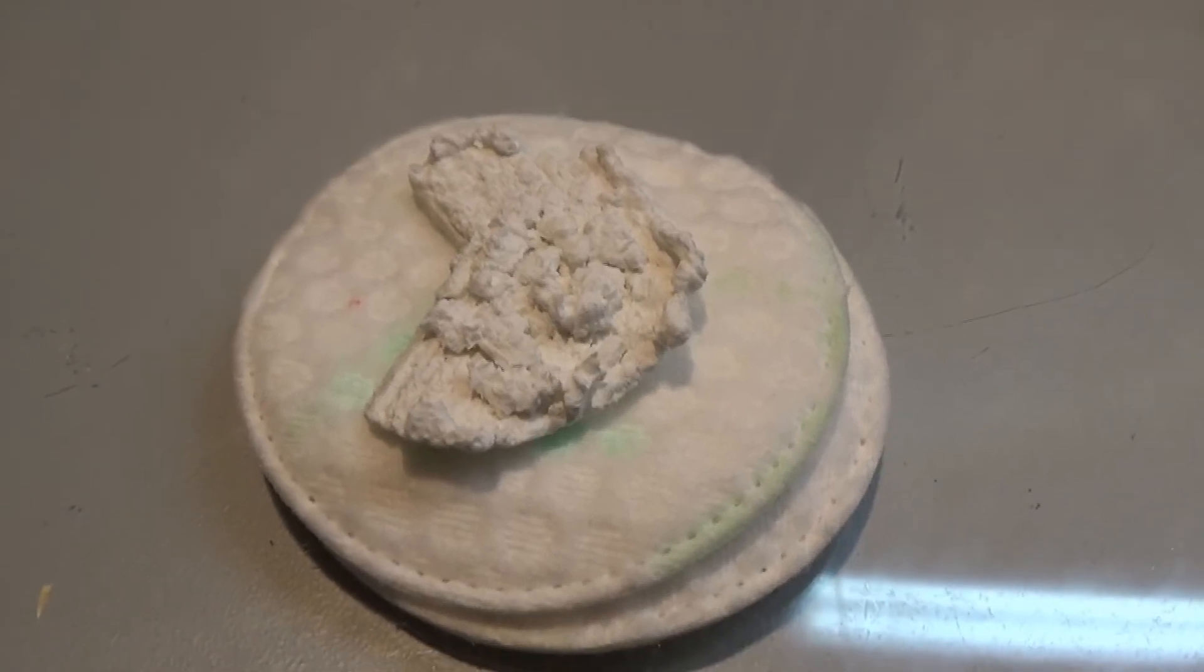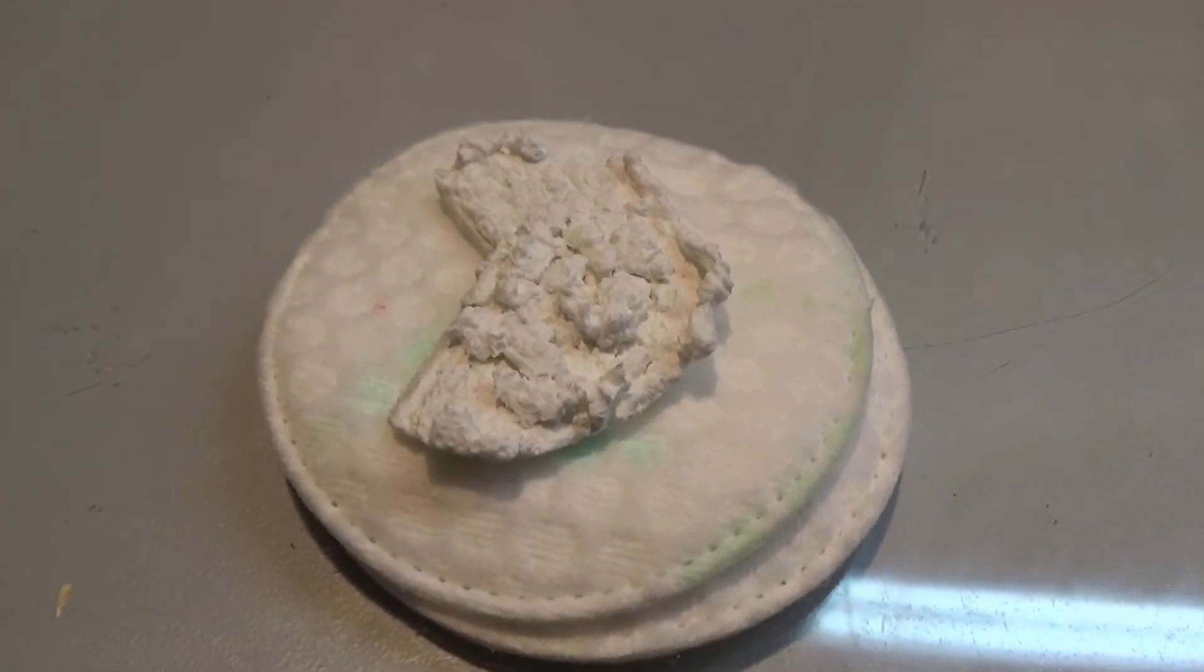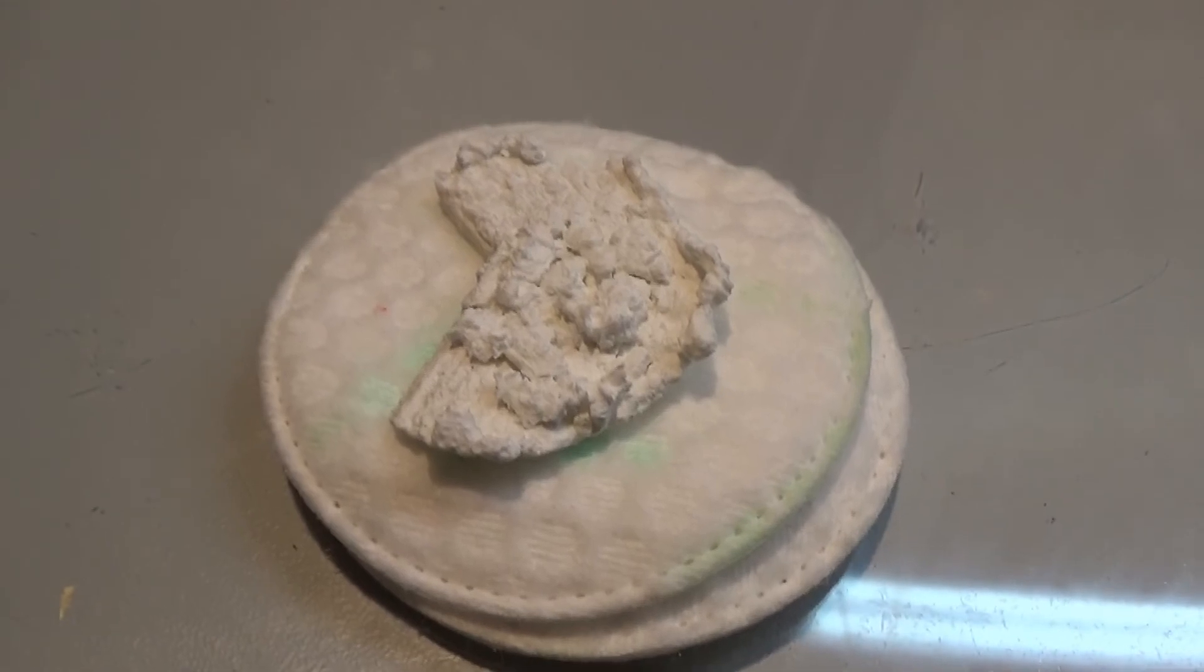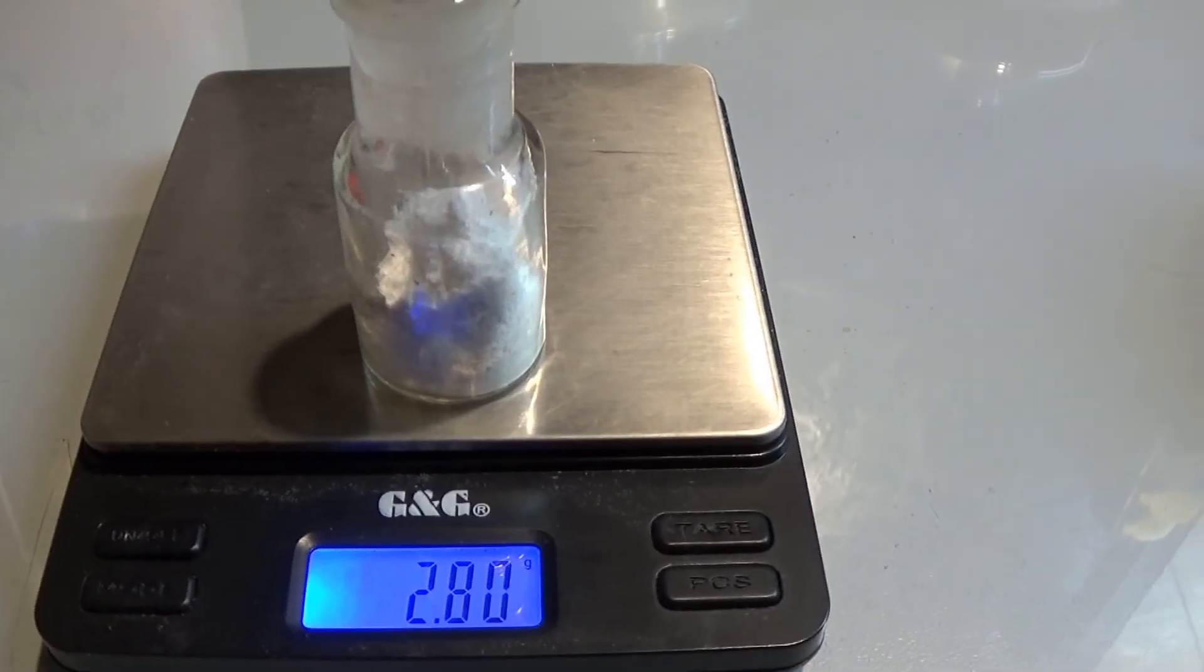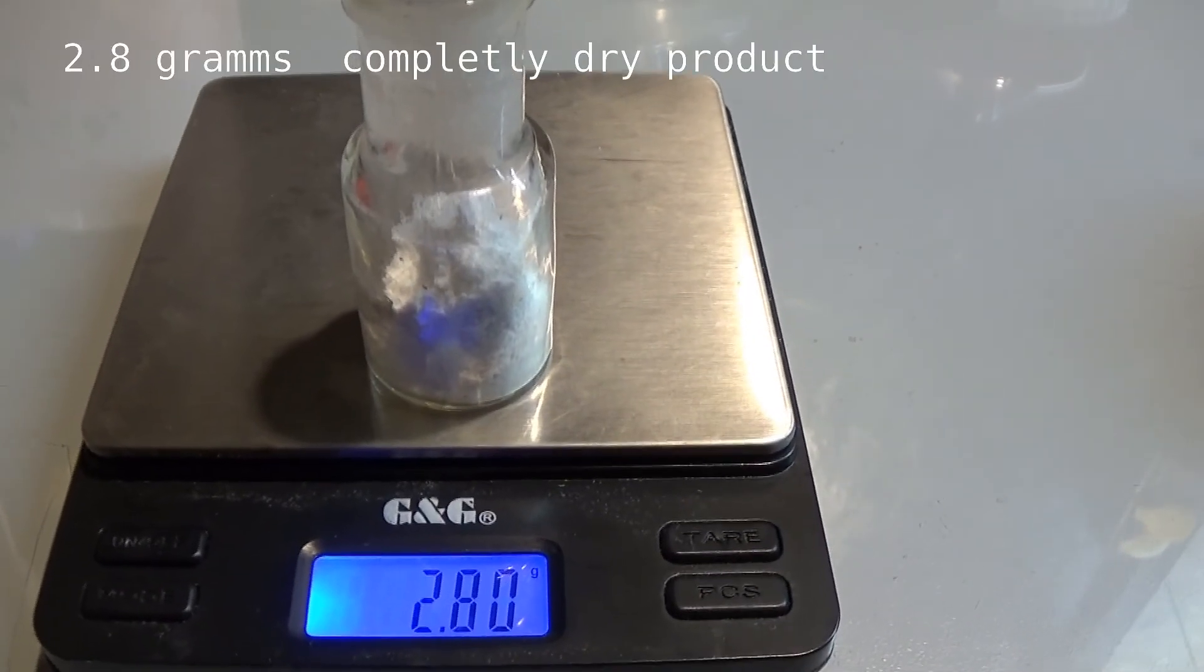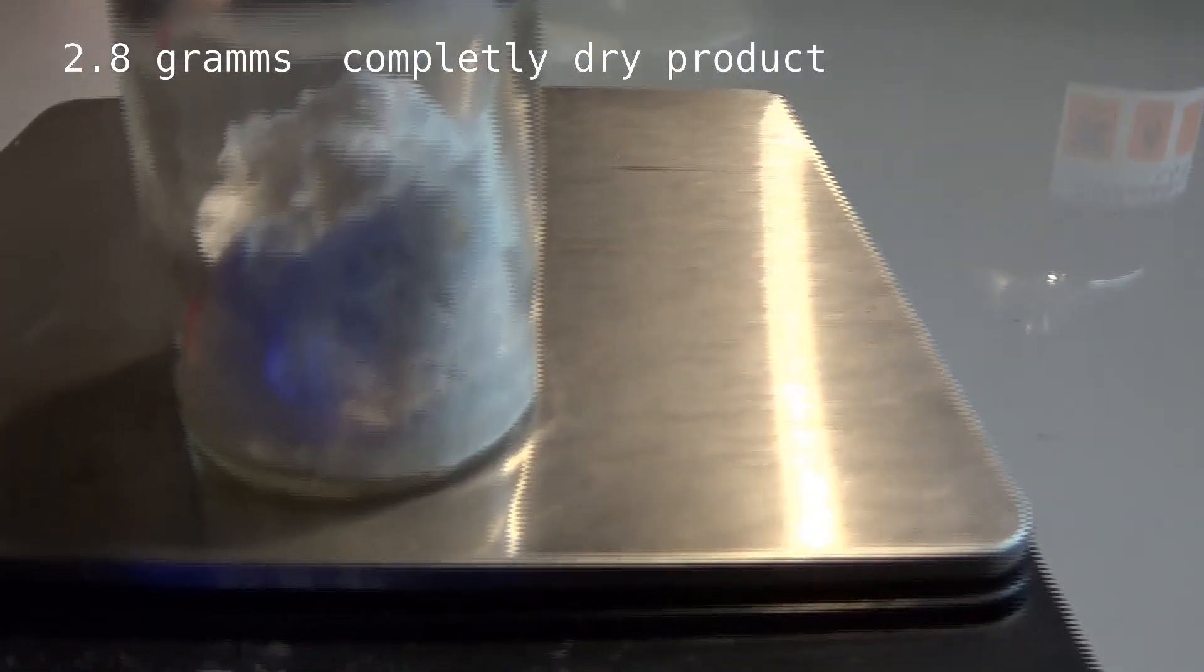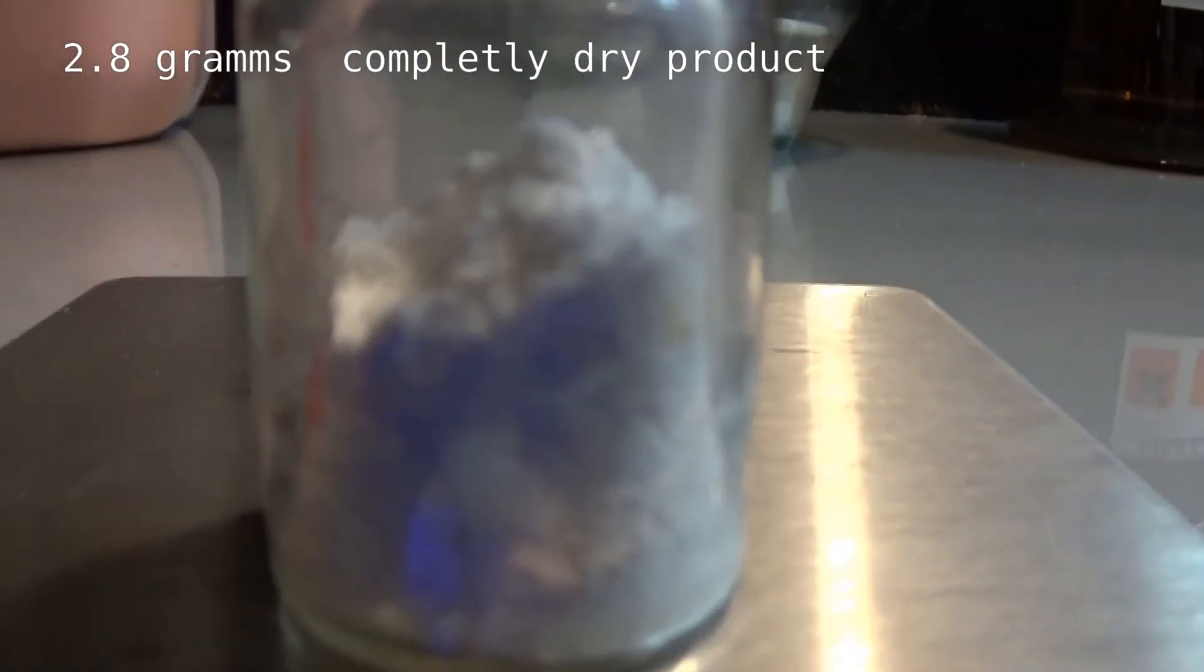But the melting point was only 0.2 degrees off and the smell did fit that of chloral hydrate. So with some improvements like acidifying the reaction mixture and doing part of the chlorination in a boiling water bath, the yield should be much better.